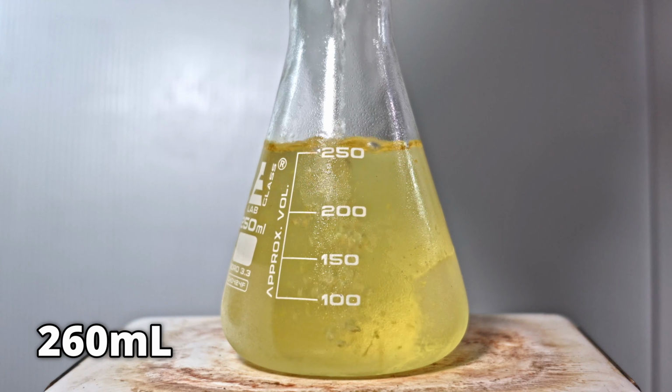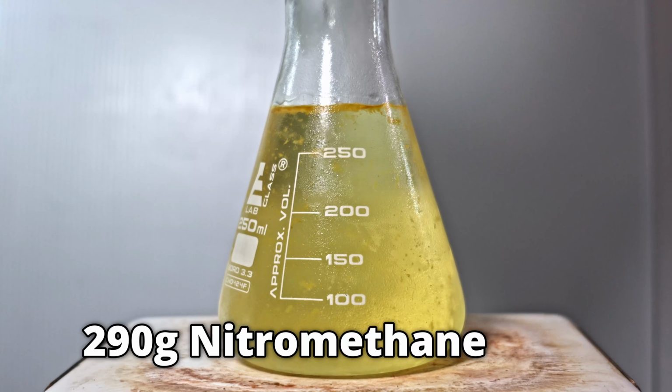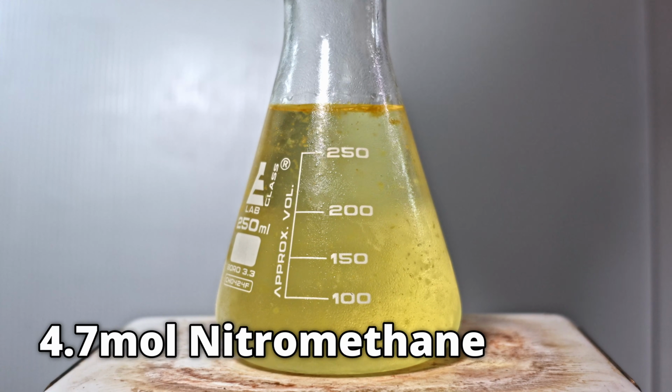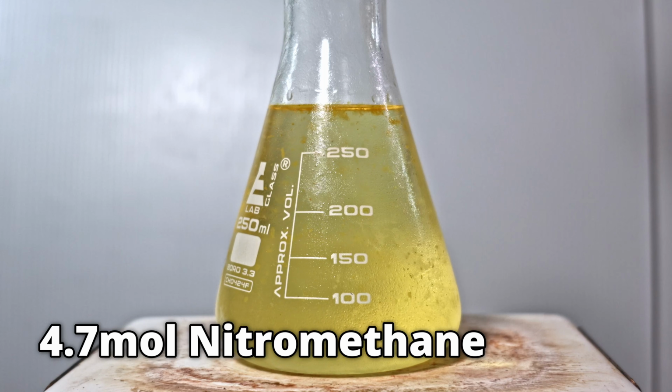With the density roughly 1.11, I'd say I have a little over 290 grams of nitromethane, or 4.7 moles of nitromethane. While this number may not be completely accurate, I'm nevertheless setting it as the basis of my percent yield.